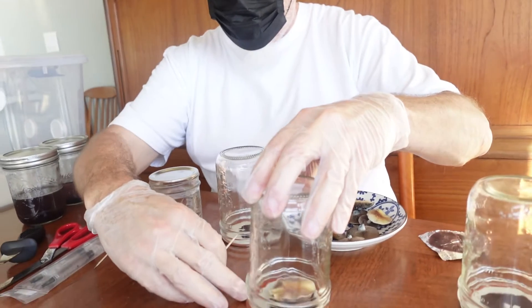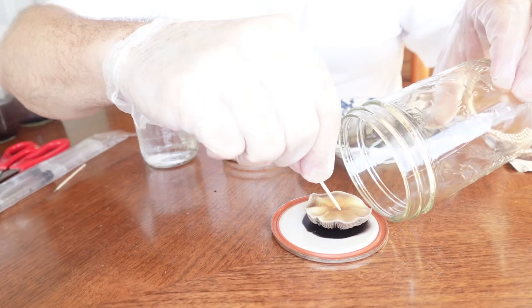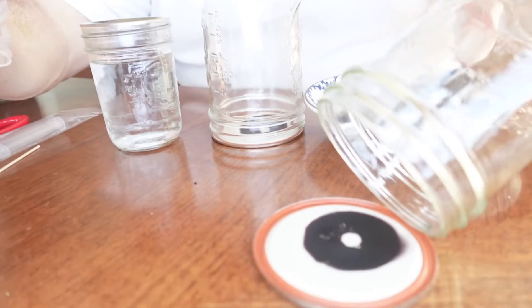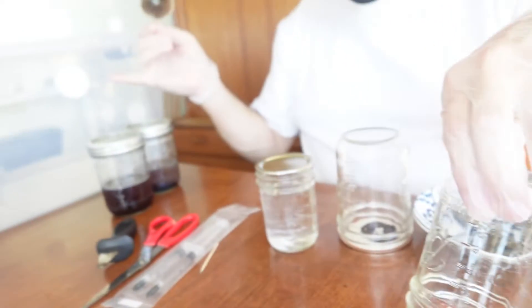Since I knew I was going to put these in water right away, I went ahead and did these. I love to do them in jars that I've sterilized, so the lid is sterile. Look at that beautiful print.